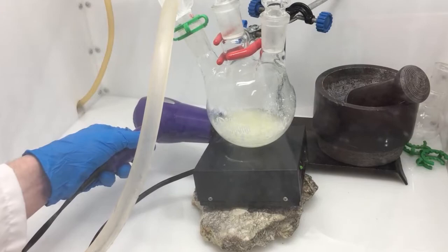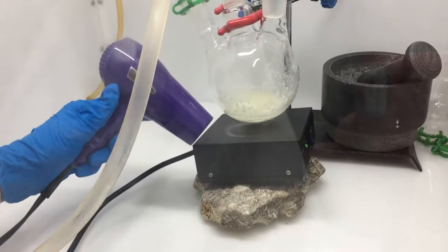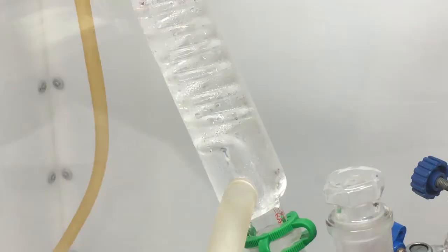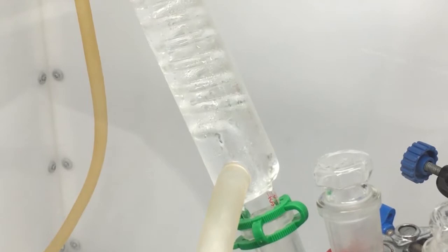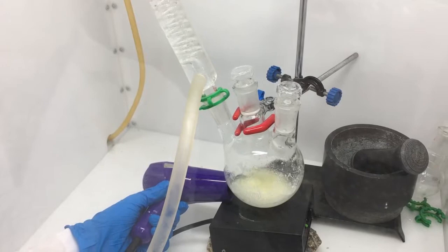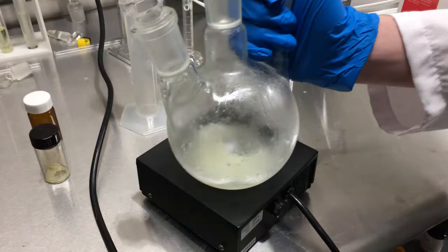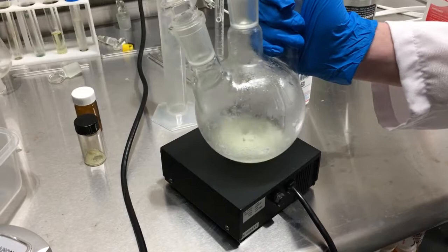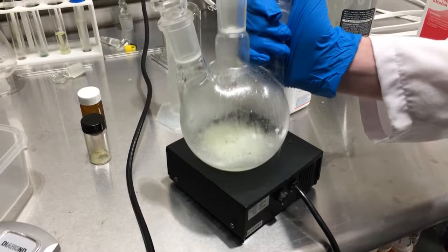This is the point where we want to reflux. Here it seemed that all my heaters would not fit with the apparatus into my fume hood and my cheap crappy heater was broke so I had no other option but to use a hairdryer which actually surprisingly worked very well and it did boil the alcohol solution. I did a risky move here by removing the addition funnel and putting in a stopper. This was actually fine because I didn't see any hydrazine vapors in the flask or in the whole apparatus.